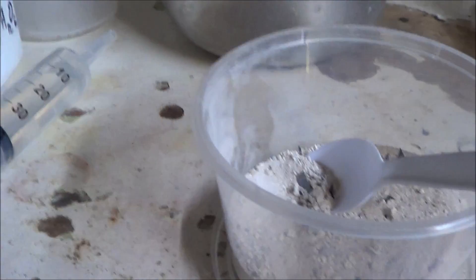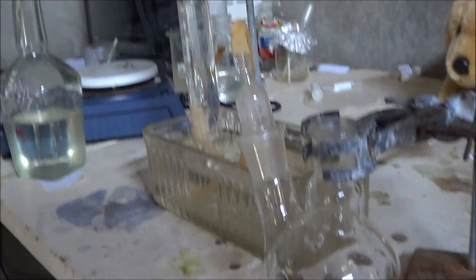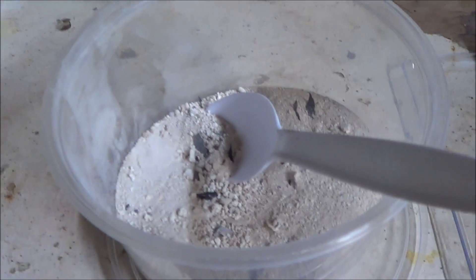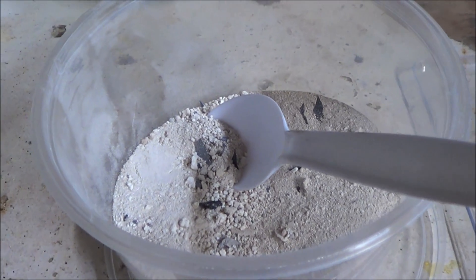We're going to test the purity by measuring the amount of gas displaced from it, because the carbonate will release carbon dioxide when acid touches it.